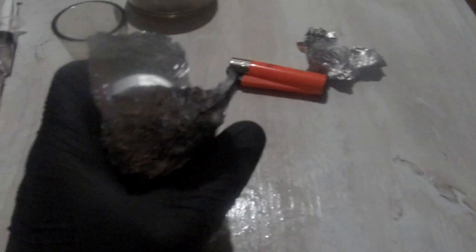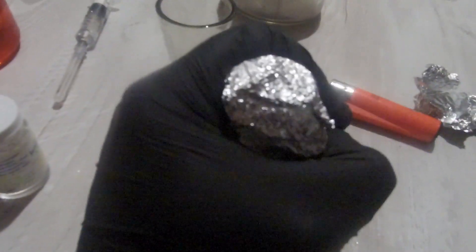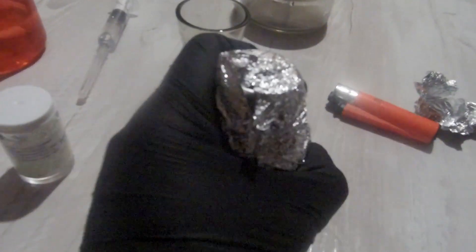We will mark the date of inoculation, put the foil back, and place the vial in a dark, warm place where the temperature is between 26 and 28 degrees centigrade.